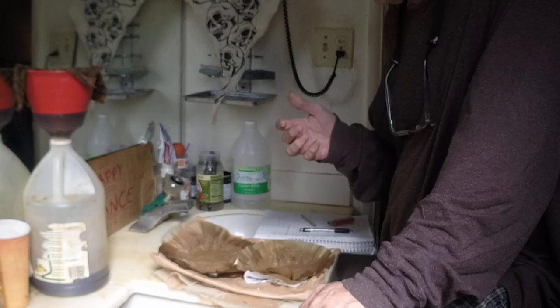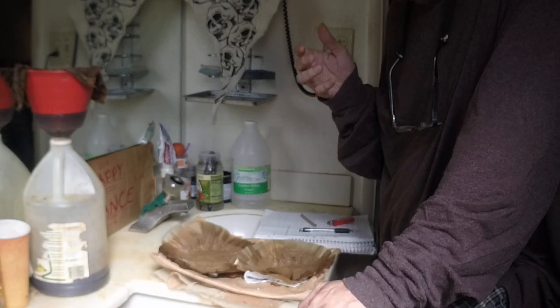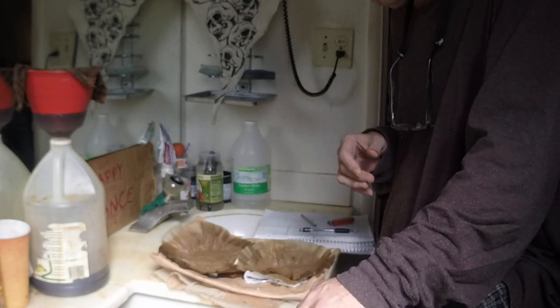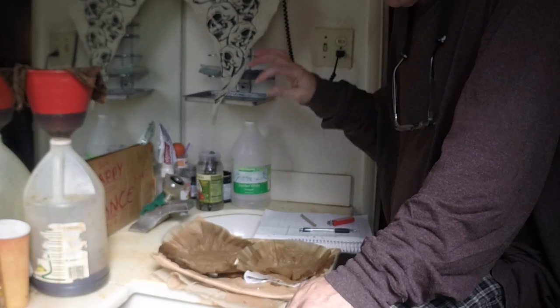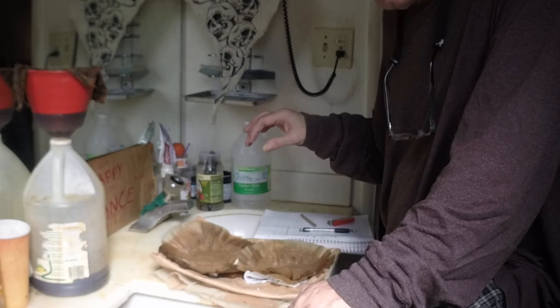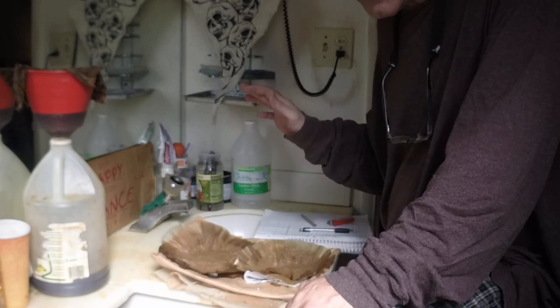When you add the sodium carbonate solution to your condensed and hopefully filtered soup, you're not dumping a shit ton of the stuff in. You're adding a little bit at a time until the color change stops. And that's all you've got to do.